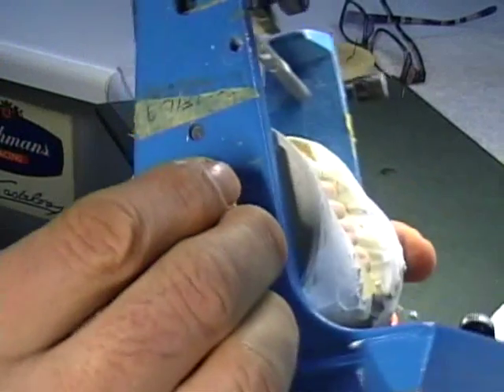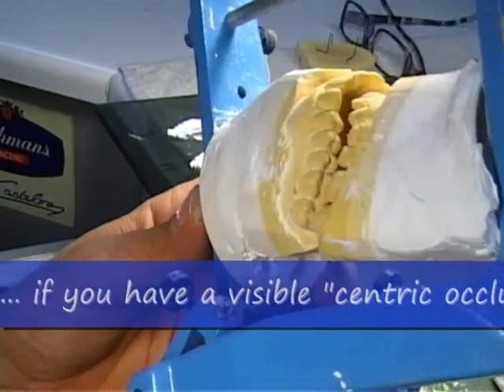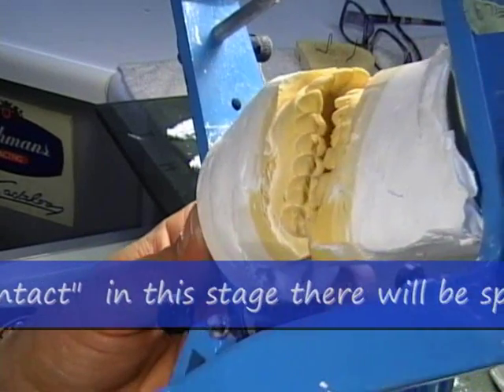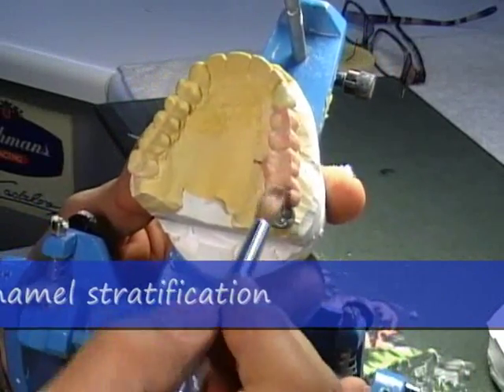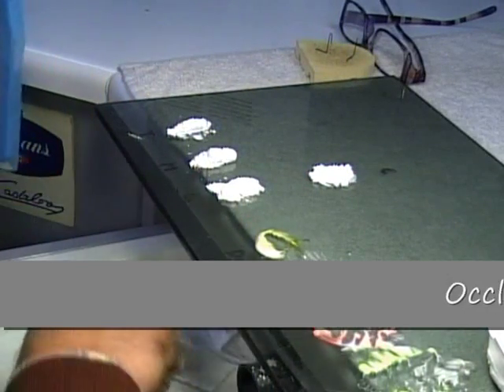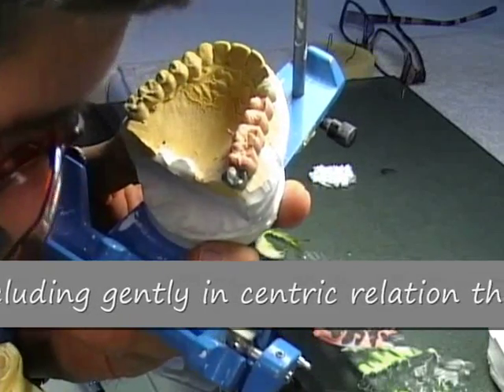What I do — look at this point while I'm doing this — is how it's occluding on the other side. If I see that I'm all the way in, that's it, I'm done. Okay, I see if I have any marks still. I do have a small mark here. Clean my brush, put it back. I do have a mark.